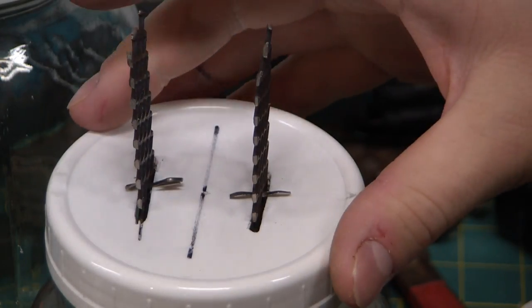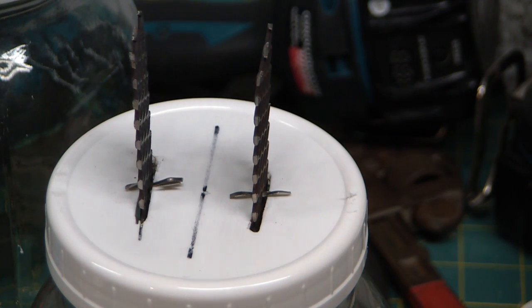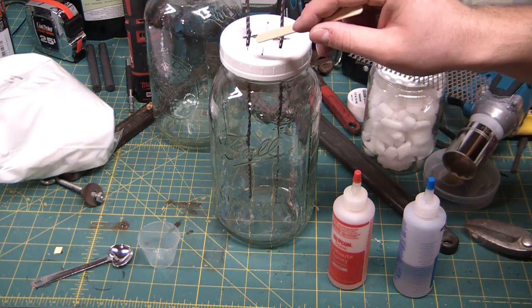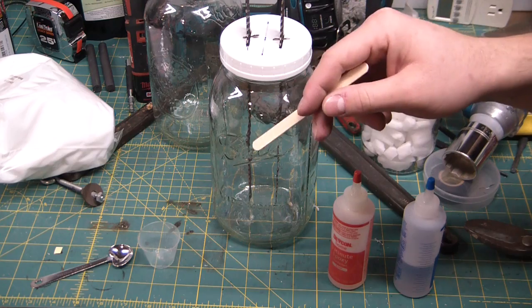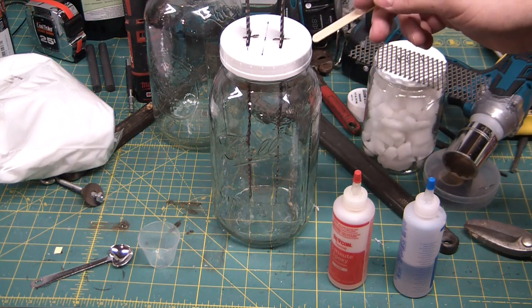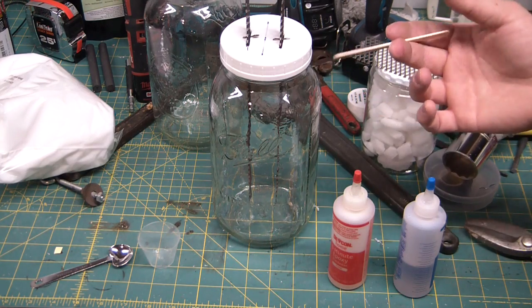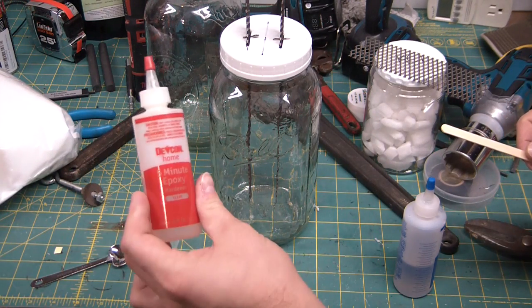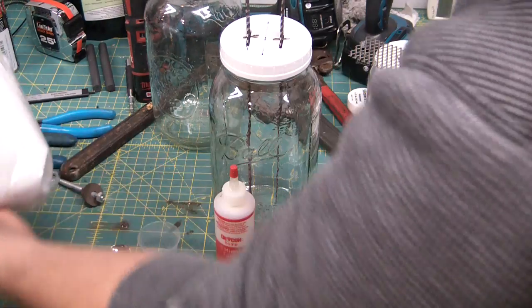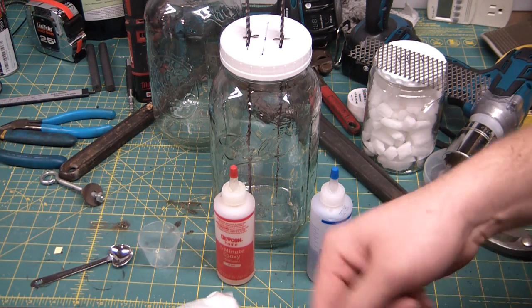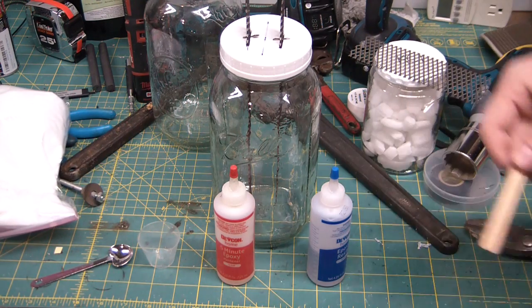So to hold the electrodes in place while I get ready to glue them up, I just cut off a couple little pieces of this super cheap titanium sheet I got off eBay. It's actually real titanium, I spark tested it. I'm using that to hold these nice and center. So I was planning on using JB weld to fill this gap, but I remembered JB weld does have steel in it, like powdered steel added to the resin. Odds are eventually that would be eaten through because this is a nasty corrosive environment. Instead I'm gonna use some of this cheap Devcon five minute epoxy and I'm gonna add some fume silica to it just to thicken it up. So one, it doesn't go through there and two, this is essentially very lightweight glass, so it should act as a pretty resistant additive for the harsh environment that it's going to be in.